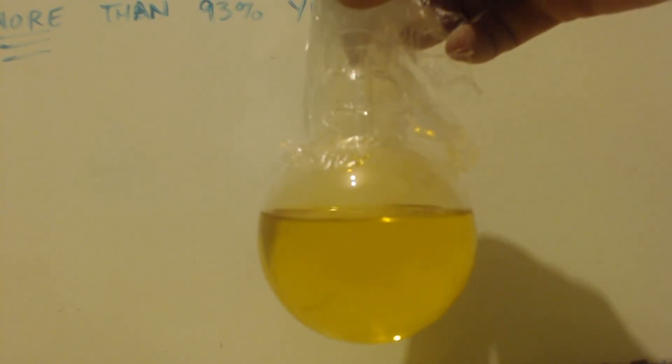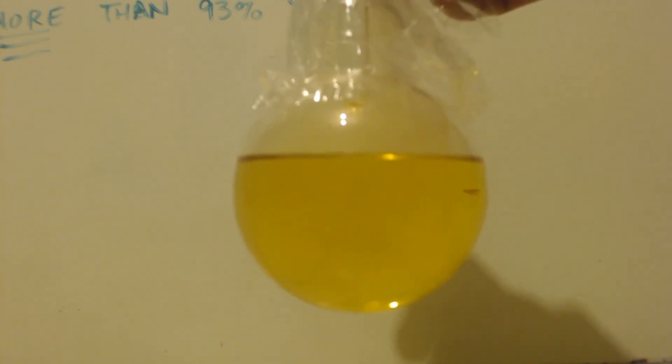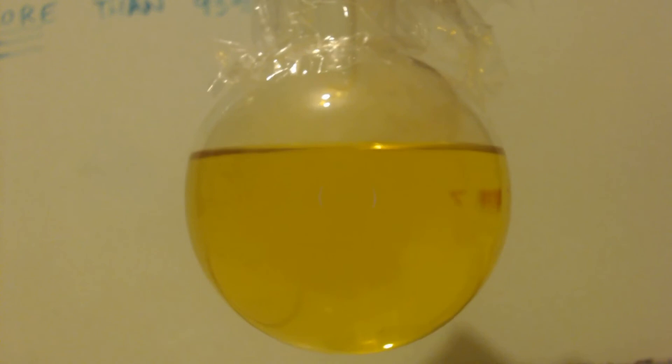Alright so here it is. It's a hundred and fifty milliliter flask. If you want to learn anything about like the difference between, this is red fuming nitric acid. You want white fuming nitric acid, you have to almost distill it or put a big vacuum on it to just get rid of the NO gases so it's clear. That's the only difference really.